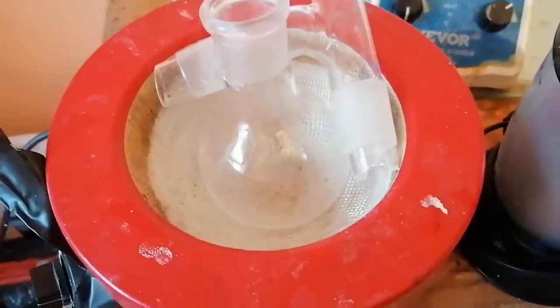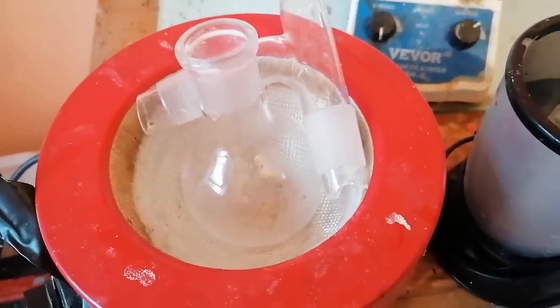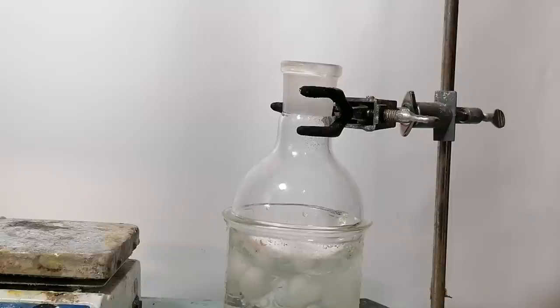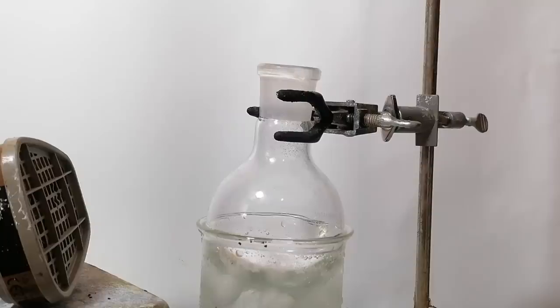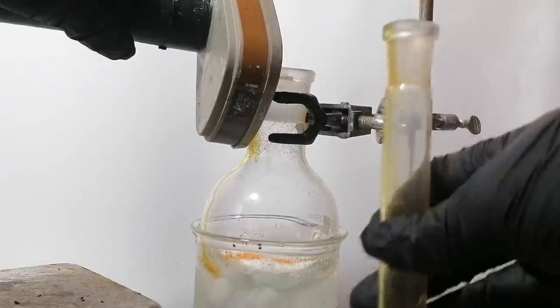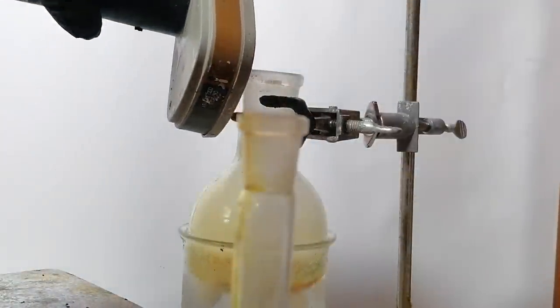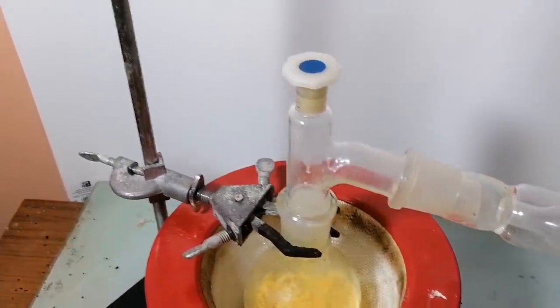I started this step by drying my glassware, leaving it on a running heating mantle for around 10 minutes. To a boiling flask was added a random amount of sodium acetate — yeah, very scientific. The boiling flask was then put into an ice bath to provide sufficient cooling for the reaction. I started up my barely breathing vacuum cleaner and started adding sulfur chlorides into the mix. The whole thing visibly got quite heated on addition and the powder started turning yellowish, due to the formation of sulfur.